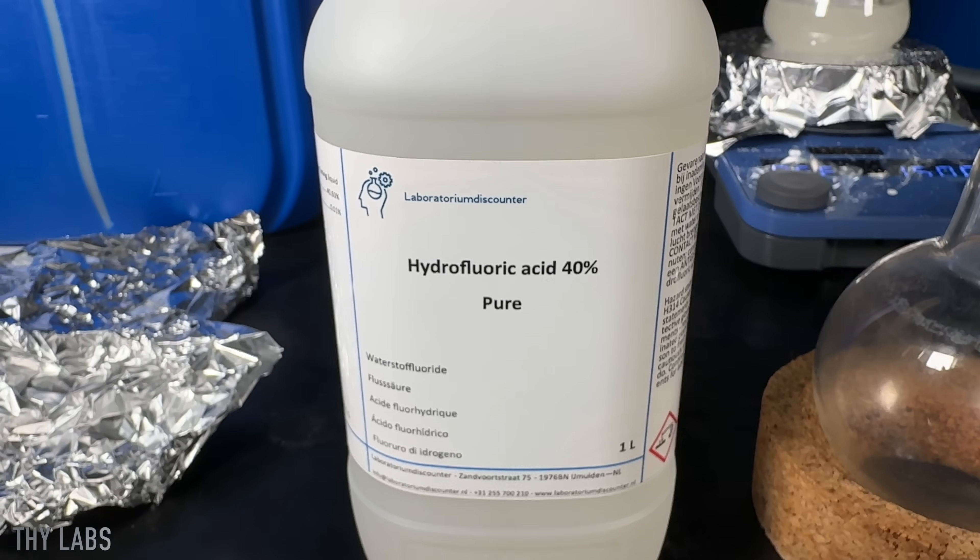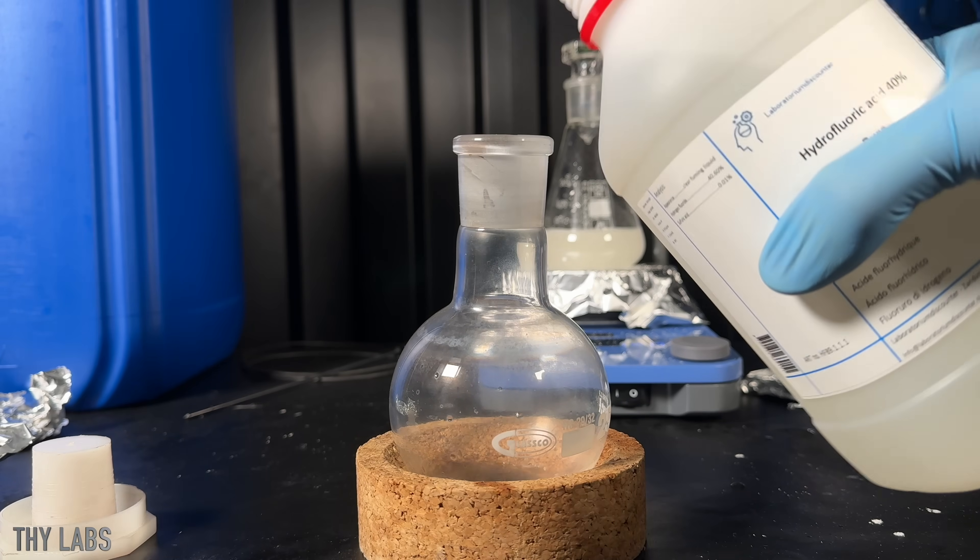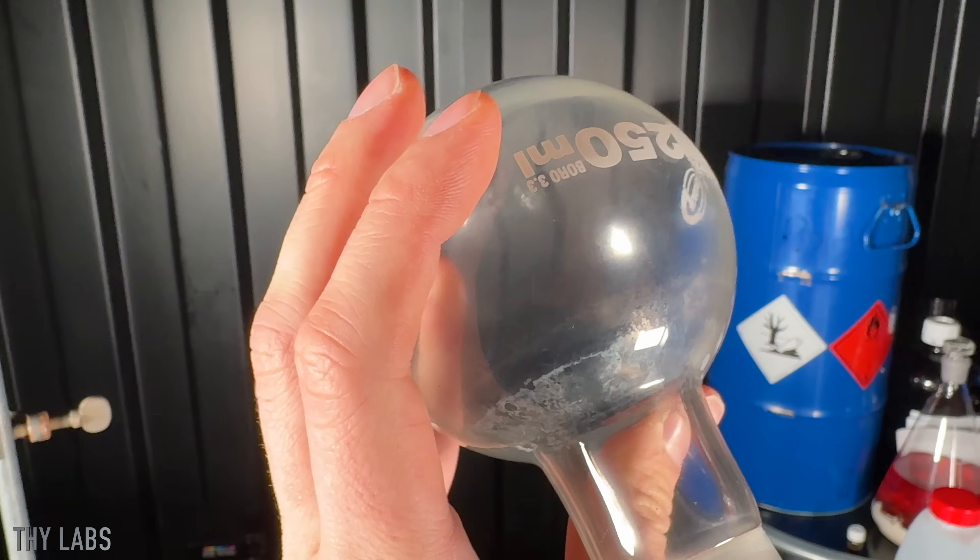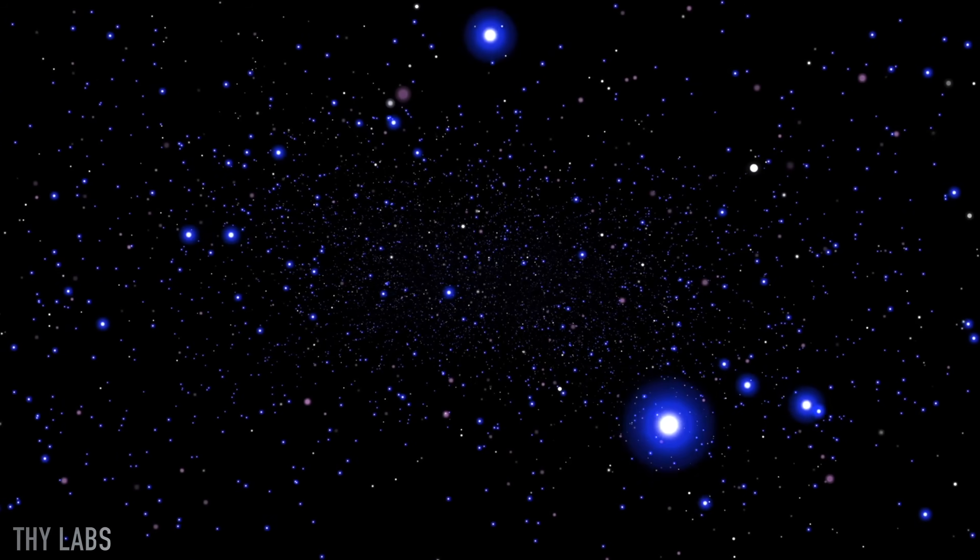As a last resort, I tried to use hydrofluoric acid, which sounds counterproductive, but yes, it can be used to clean glass. But as nothing worked, I am sure that the chemical reaction itself etched my glassware.